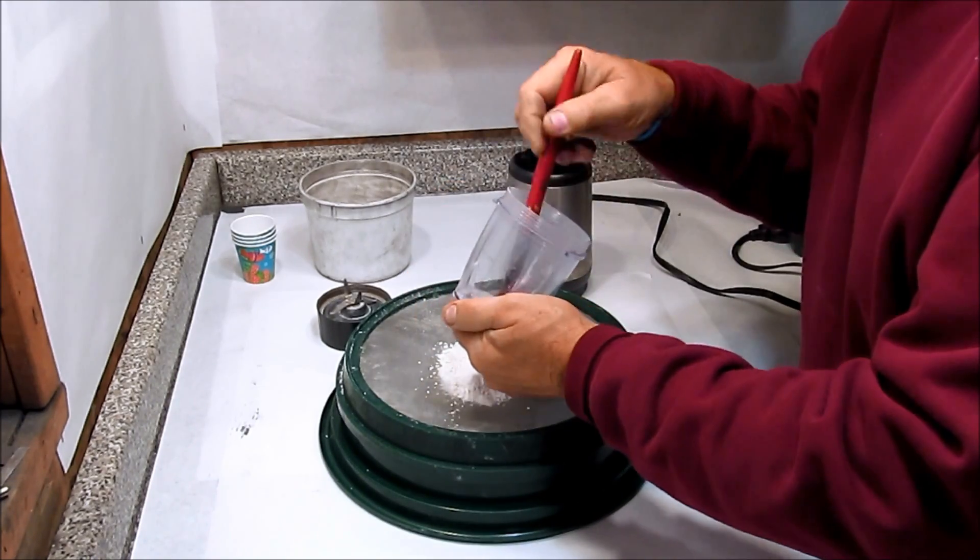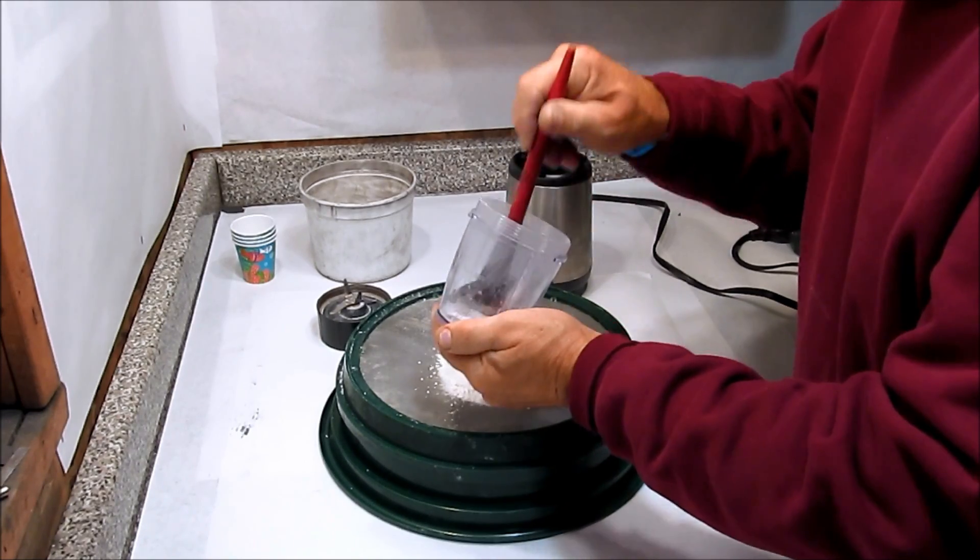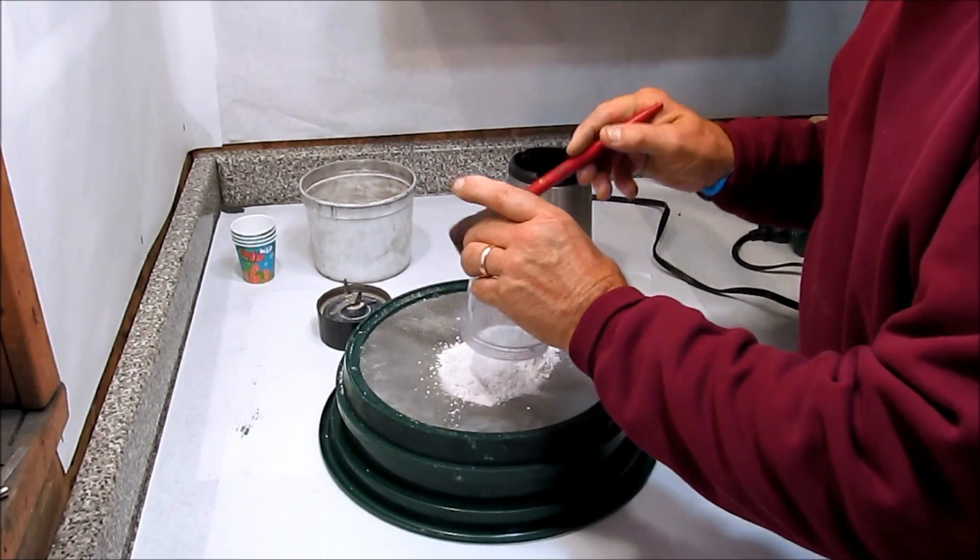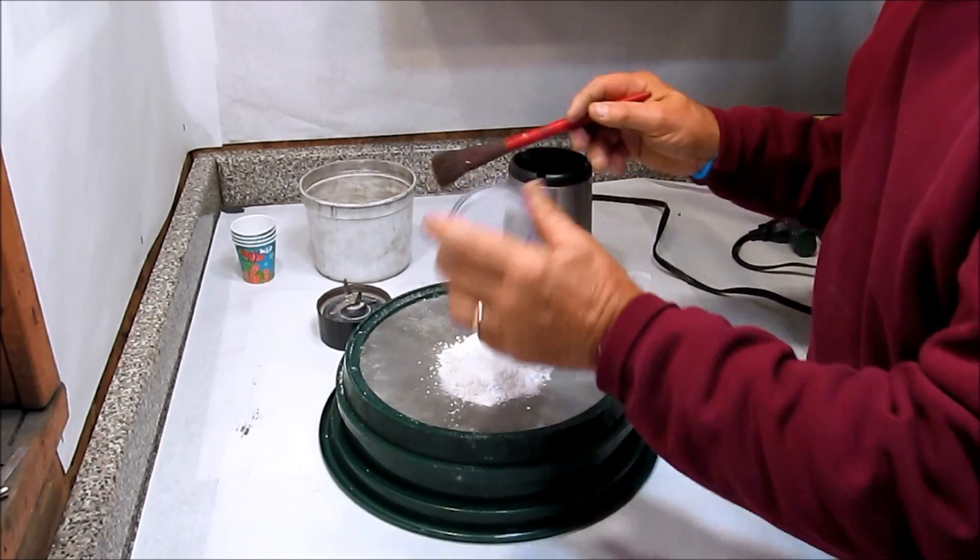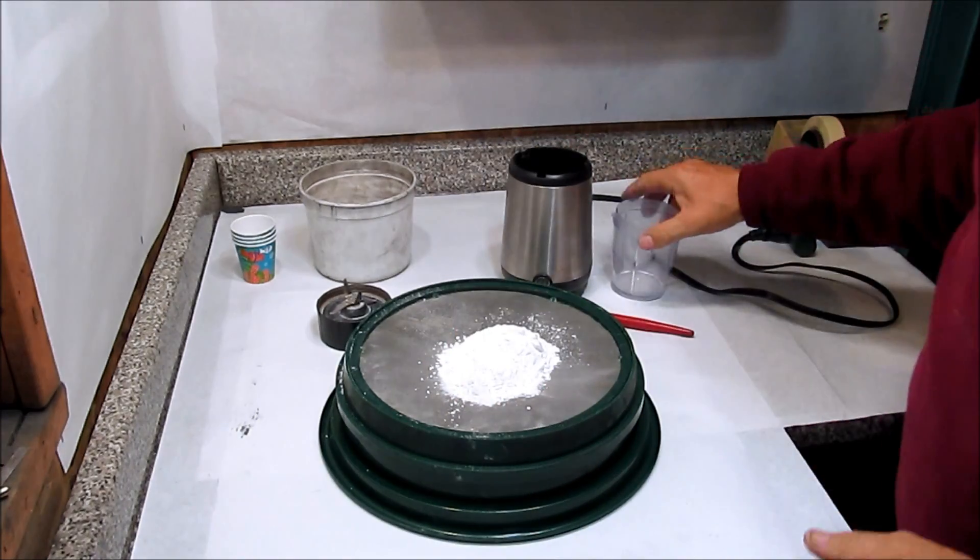I can tell I'm breathing just a little bit of this dust. So like I said, I normally would probably do this outdoors if the weather is conducive to it. I would definitely wear a dust mask.